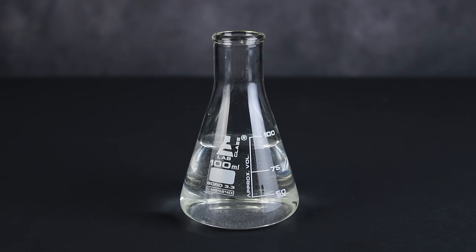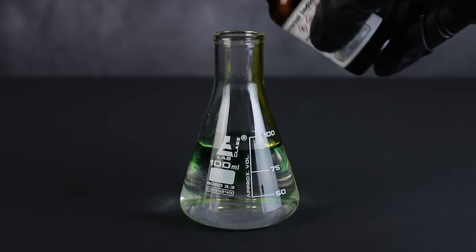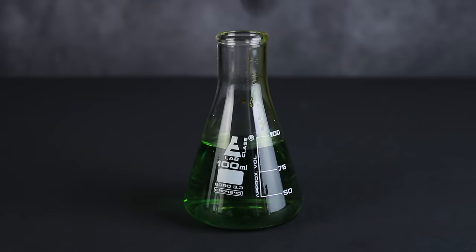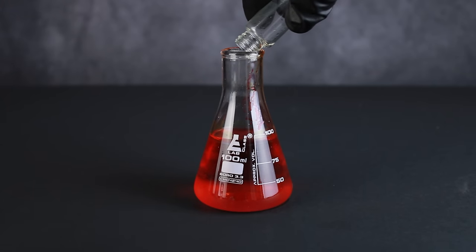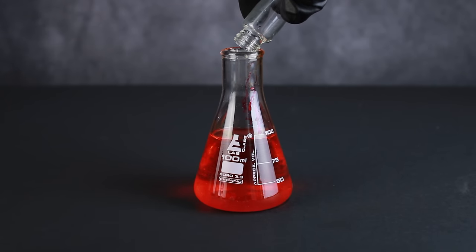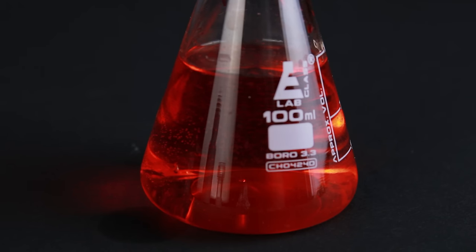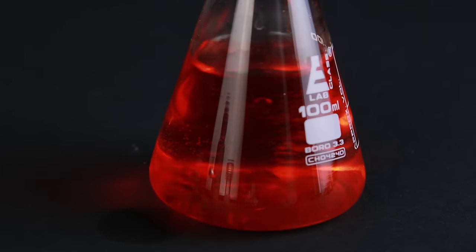Alright, now let's check out its reaction with water. I have added a few drops of universal indicator to my water to help spice things up a little, and as you can see, the solution turns highly acidic as soon as the anhydride is added. This is to be expected, since the anhydride reacts with water to produce acetic acid. Something I did not expect was the apparently poor solubility of acetic anhydride in water. I kinda figured it would react violently and exothermically, but much like the sulfur chlorides used to make it, it just beaded up and sank to the bottom of the flask. It took some stirring, but eventually, I was able to dissolve everything.